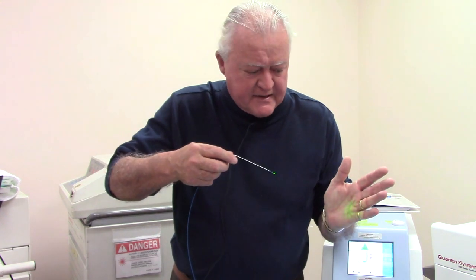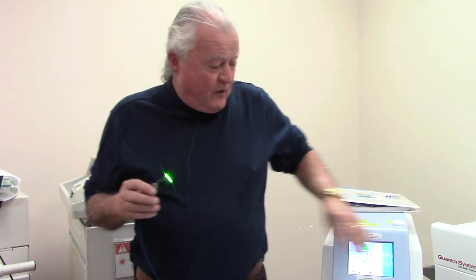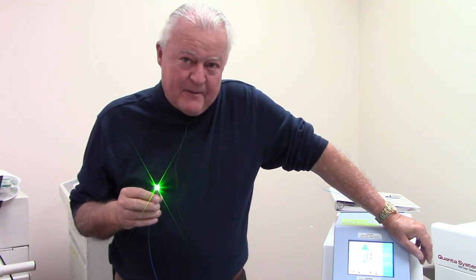I'm set up at 1.2 joules, 10 hertz, at 12 watts average power — you've already seen this on my hand. Let me do that out here so you can see. I hope you can hear the beeping in the background — it is firing. I feel the warmth. Now, please do not try this at home, at work, or anywhere else. I've been doing this for more than 40 years and some people would consider me a laser safety expert. I want to show you what happens with this laser at these settings if I point it directly at my eye from a distance. I am not going to hurt myself. Remember: MPE values for skin are exactly the same as they are for the eye. So if it does not burn my skin, it's not going to burn the skin of my eye — which is my cornea.